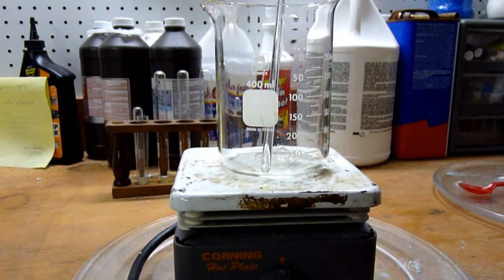Hi everybody, Doug here with another Doug's Live video. Today I'm going to be filming the third in a series of videos about copper compounds. Today we'll be making copper oxide from copper carbonate.